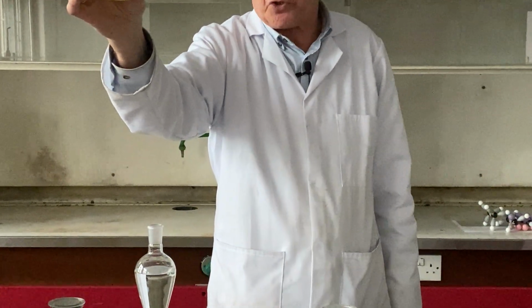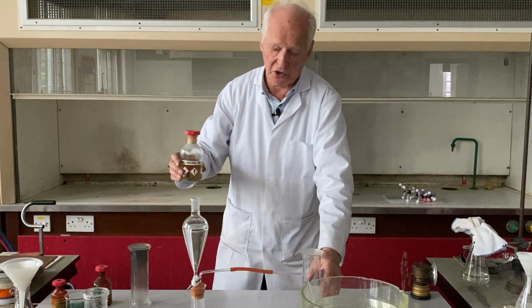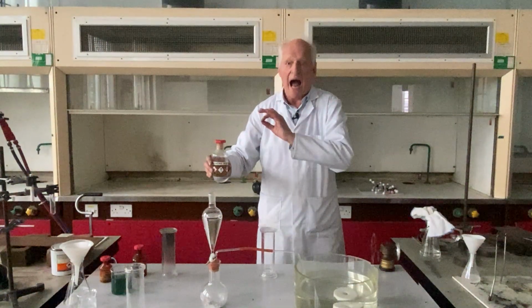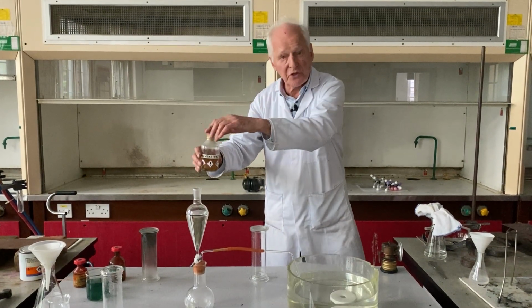And at this concentration, it really doesn't pose health hazards. It's very, very dilute indeed. More concentrated solutions are extremely dangerous. Toxic vapor, bromine, unbelievably toxic and corrosive, so we stay well away. But at this concentration, there is no great danger.